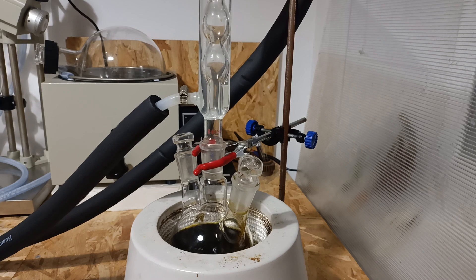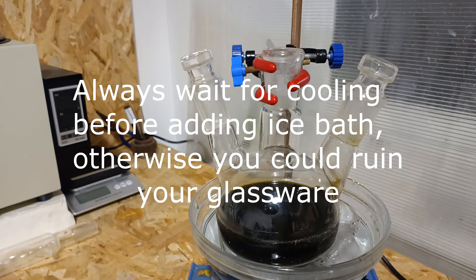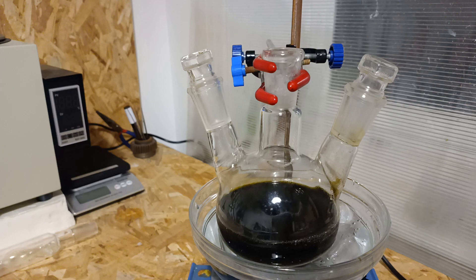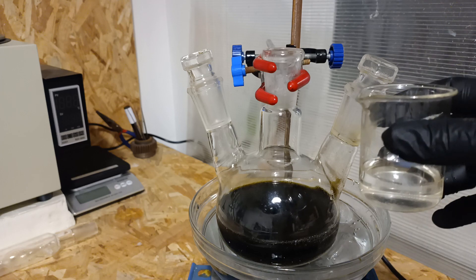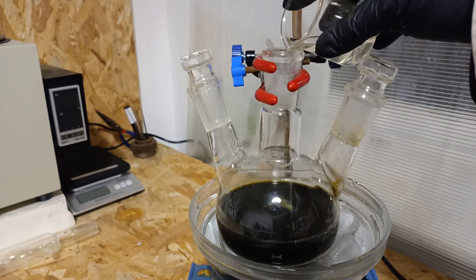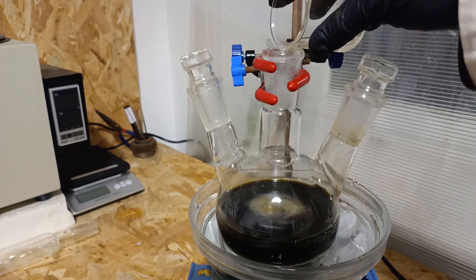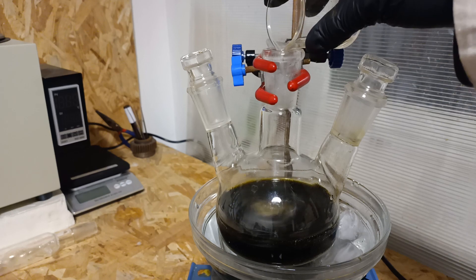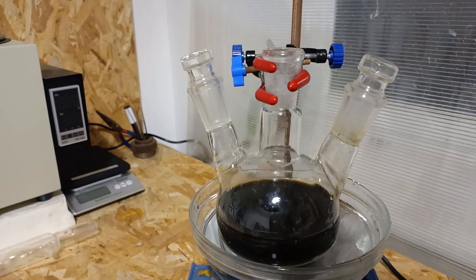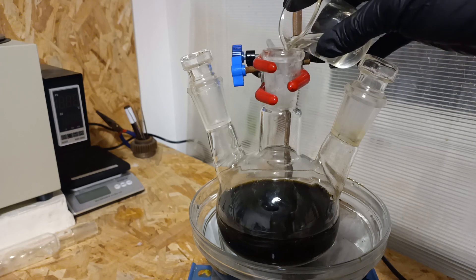Insulation is removed and the mixture is left to stand until it cools to room temperature. The reaction is placed in an ice bath with stirring. Dilute sulfuric acid is then added slowly into our reaction vessel. If you use too much acid, your product will not crystallize properly in the next steps and will come as an oil. Do not acidify too much — we just need it to be slightly acidic. I used sulfuric acid as it's not volatile and will not corrode my oven during the drying process.